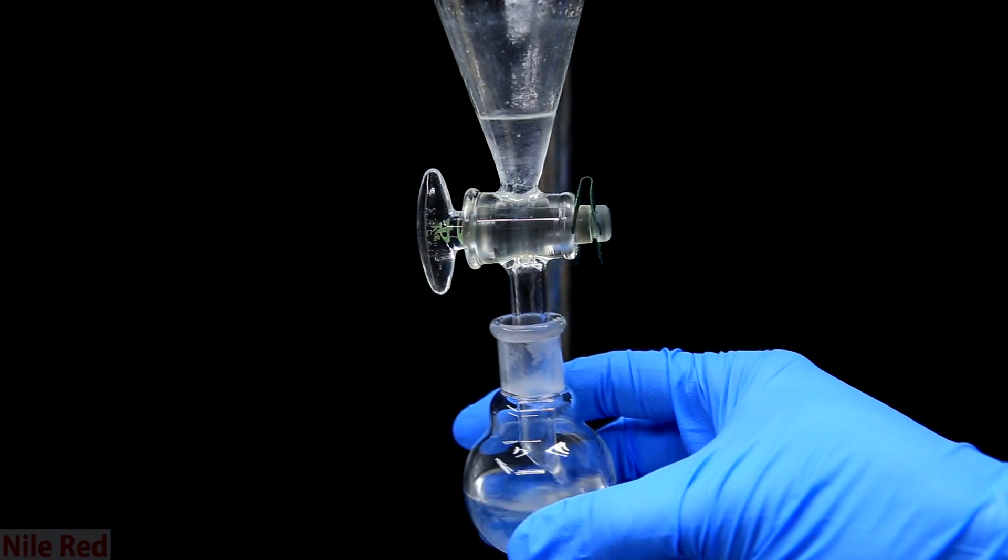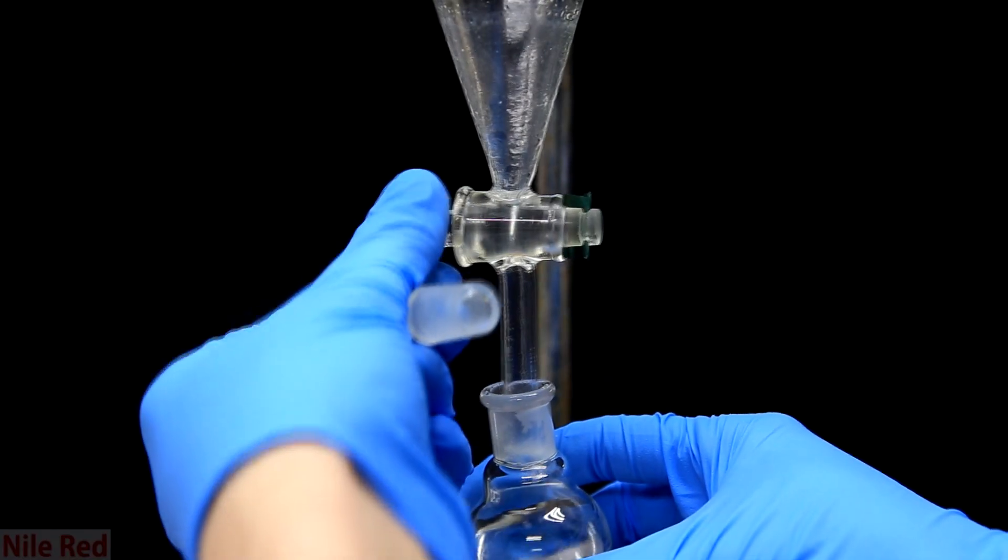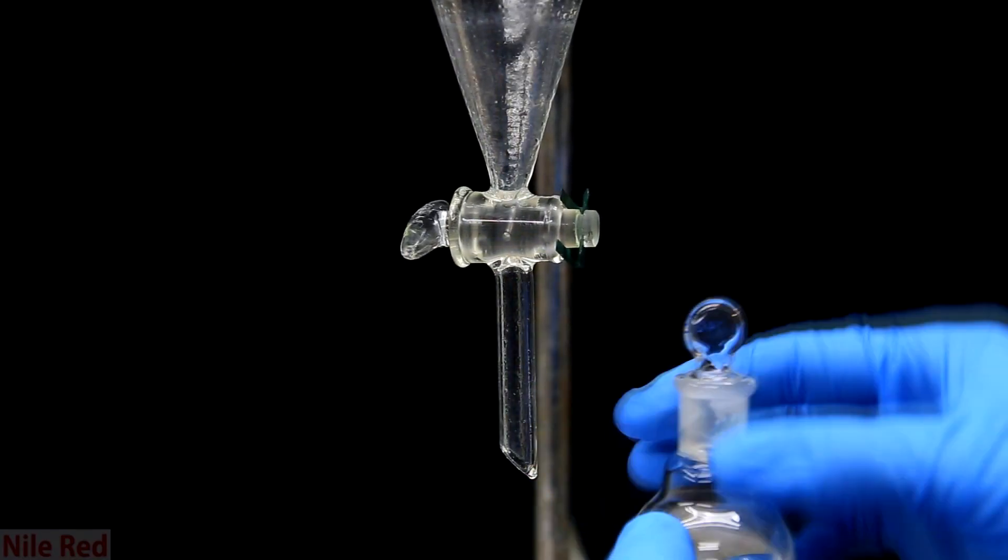So after doing this three times we're left with a flask containing about 15 milliliters of diethyl ether with our product dissolved in it.